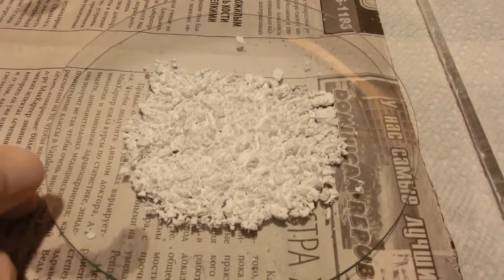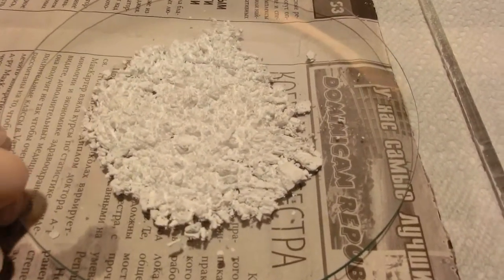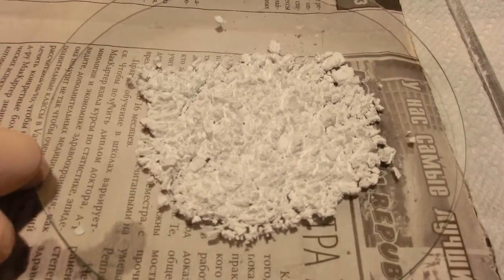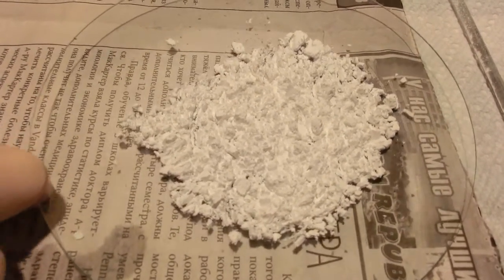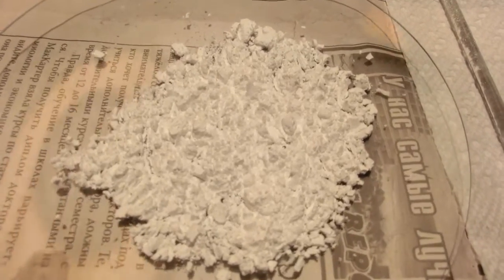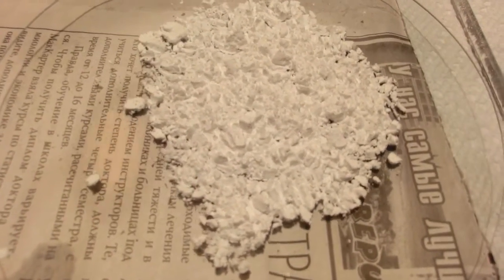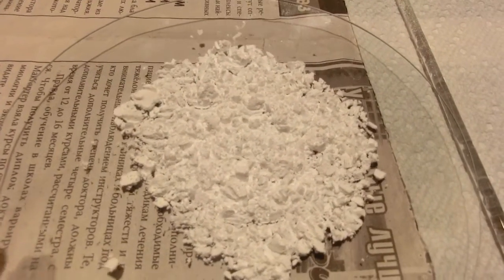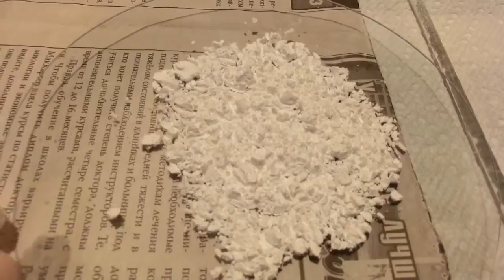After drawing air through the filter cake for about 20 minutes, I was able to get this lead carbonate pretty dry. And as you can see, it's a nice white color. It's still a little bit moist.